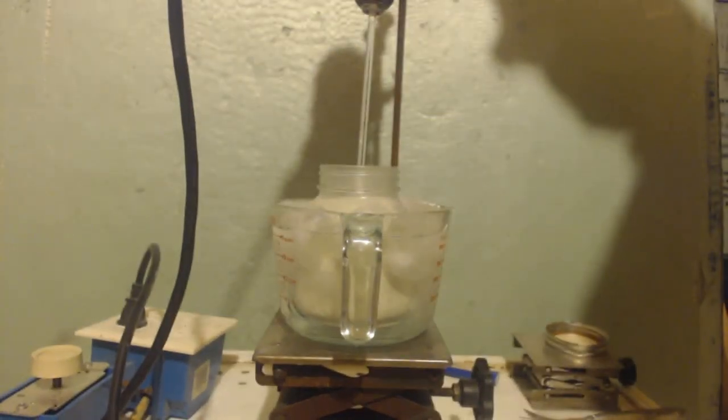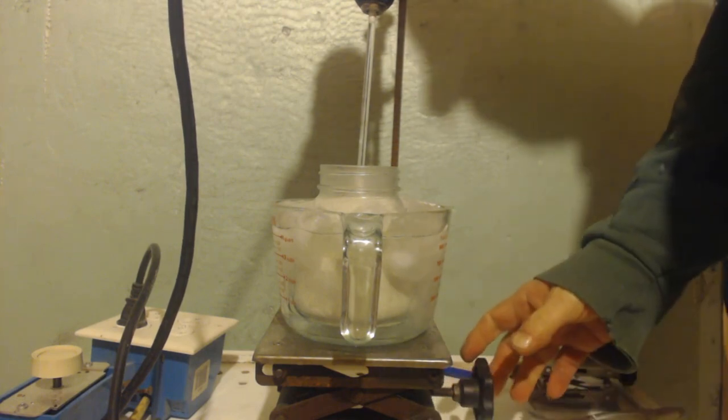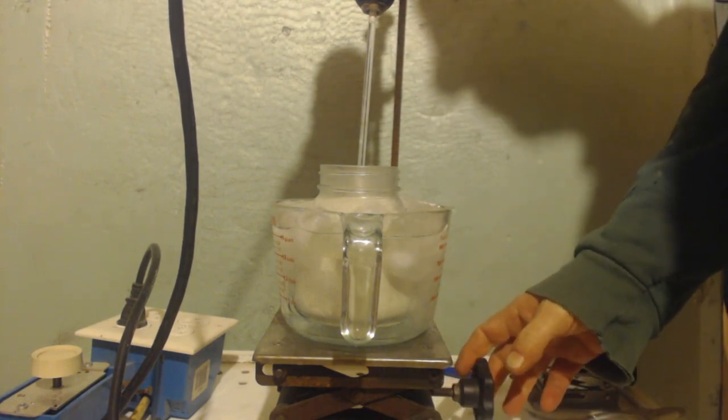I've evaporated probably an inch of diethyl ether out of there. I'm actually in the process right now of making some more ether because I ran out. I'll get back to you and let you know how long I stir for again. I'm going to keep it cold though. I'm not going to let it warm up to room temperature.